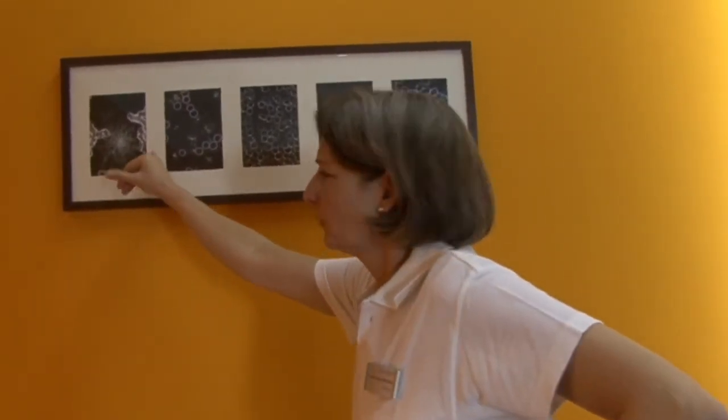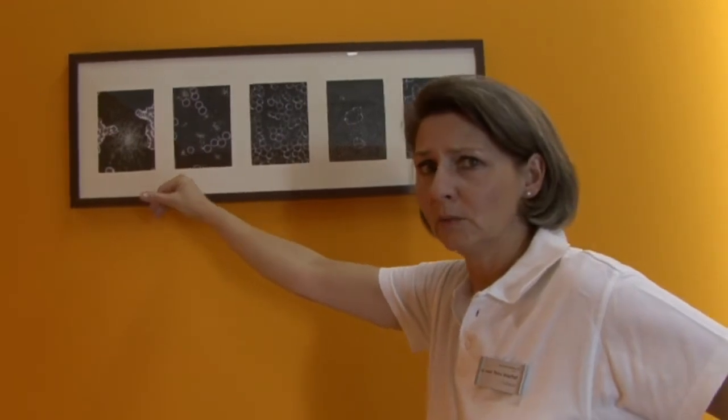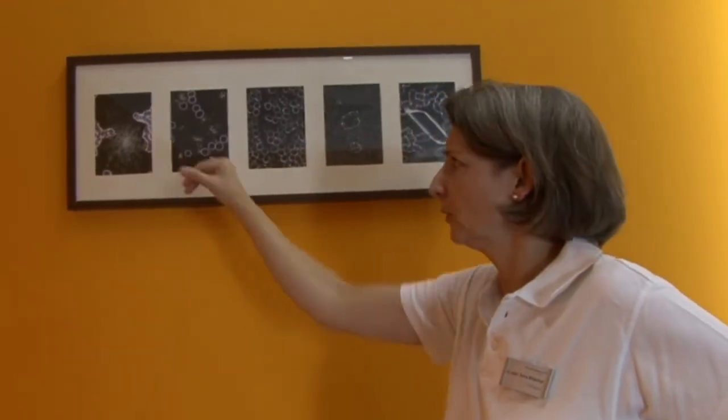On the other hand, here the red blood cells form lumps, which means the membrane tension became too weak, which might indicate that a blood circulatory disorder is on its way.